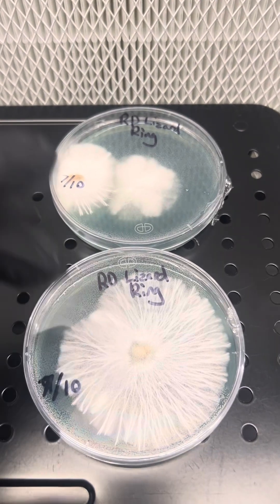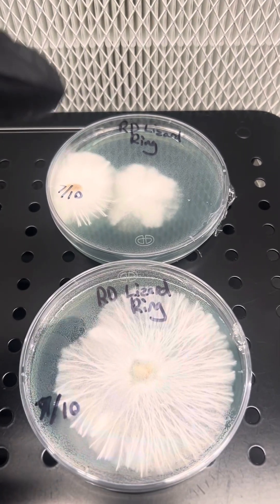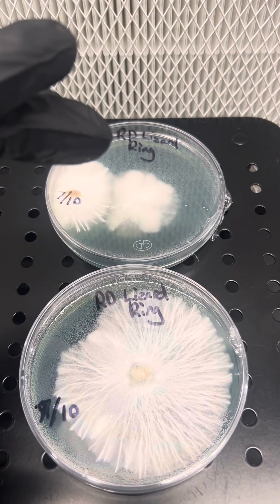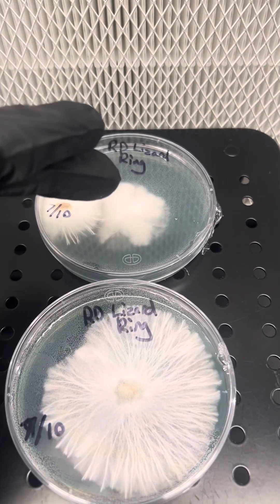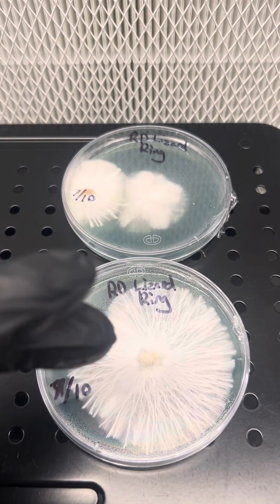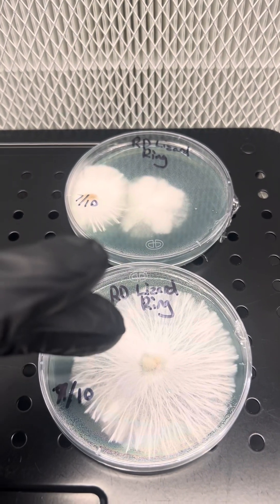This is more of a clone. The first step in cloning a mushroom is taking a tissue sample to carry over the characteristics of what you're trying to chase.